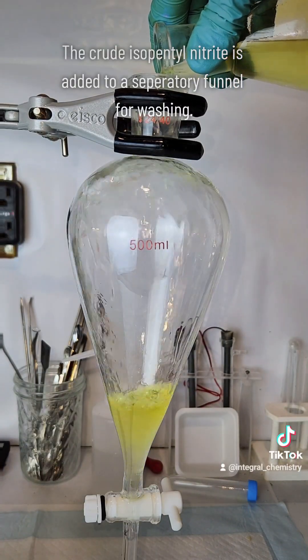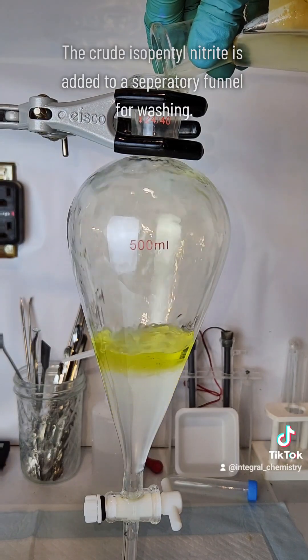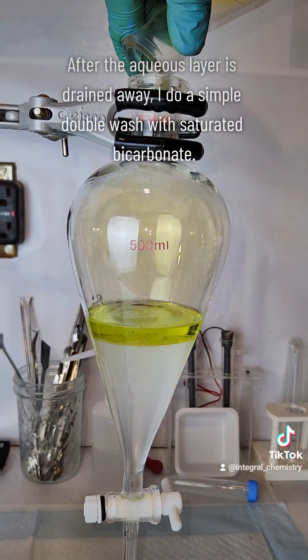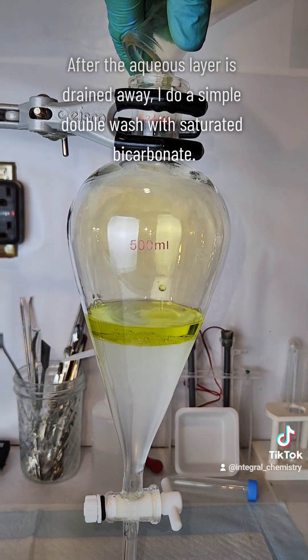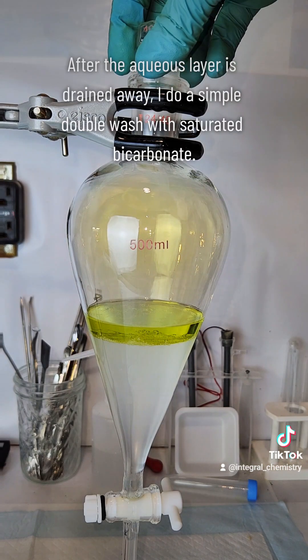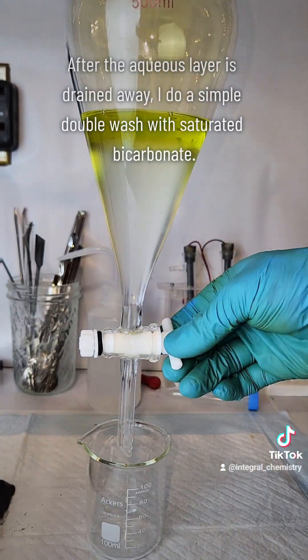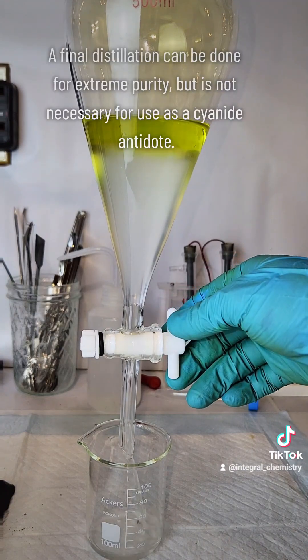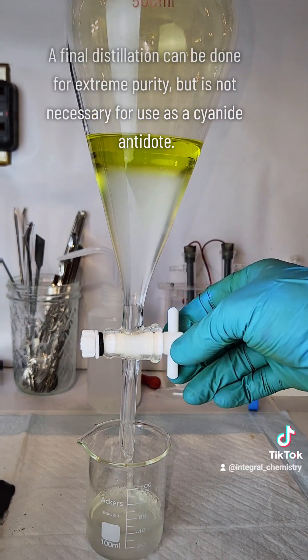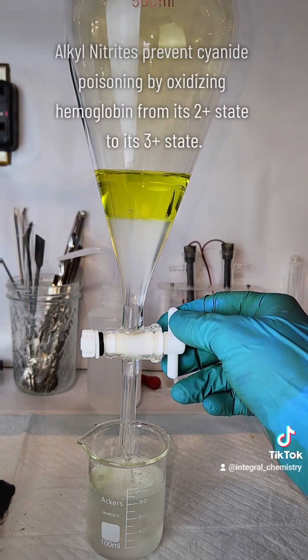In any case, once I feel the reaction is pretty much complete, I transfer my crude isopentyl nitrite to a separatory funnel to do a couple of washing steps. I'm just going to drain away the lower aqueous layer and then do two thorough washings with a saturated sodium bicarbonate solution, which should be more than adequate for its use as an antidote.